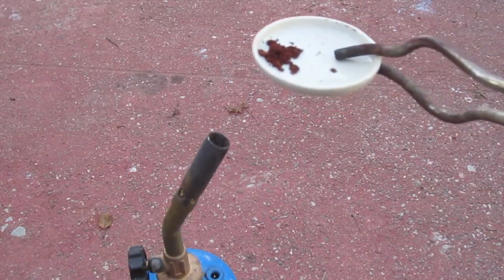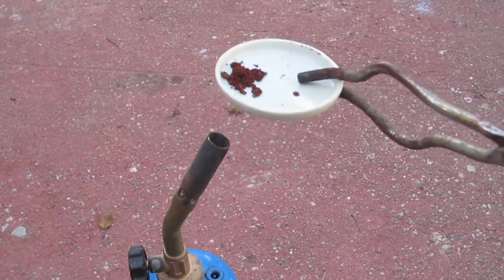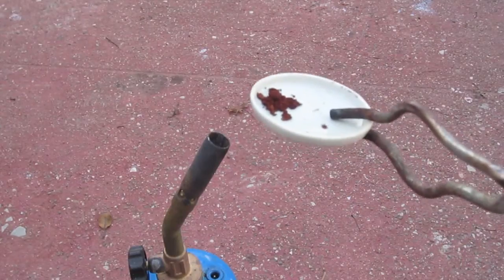Take your dry product and put it on some heat-resistant thing, and heat it up with a propane torch.